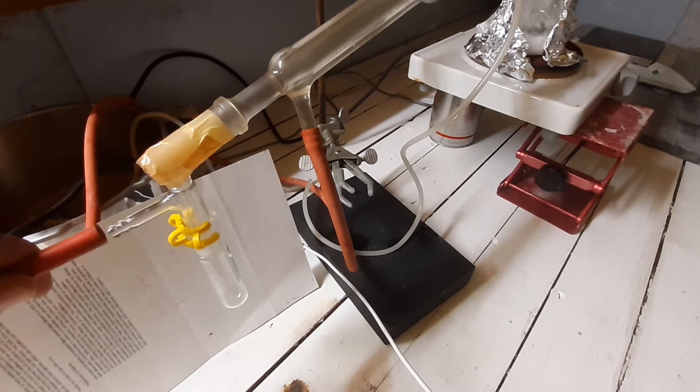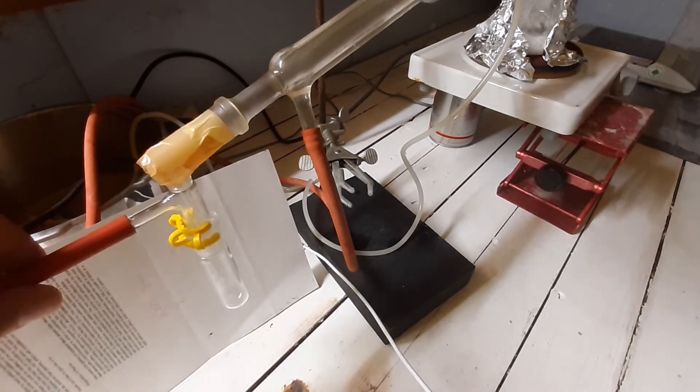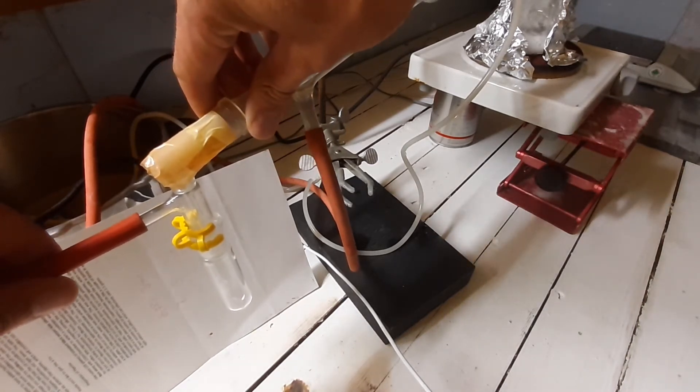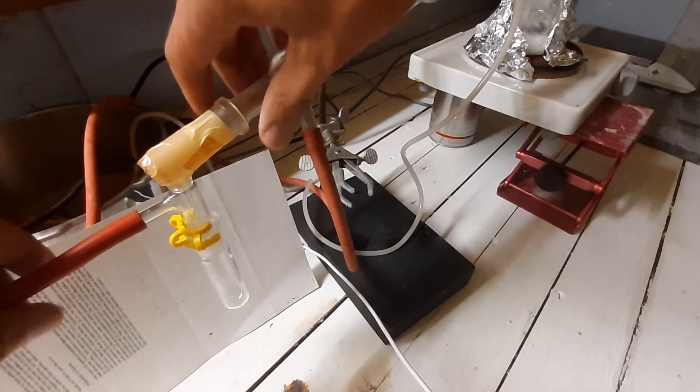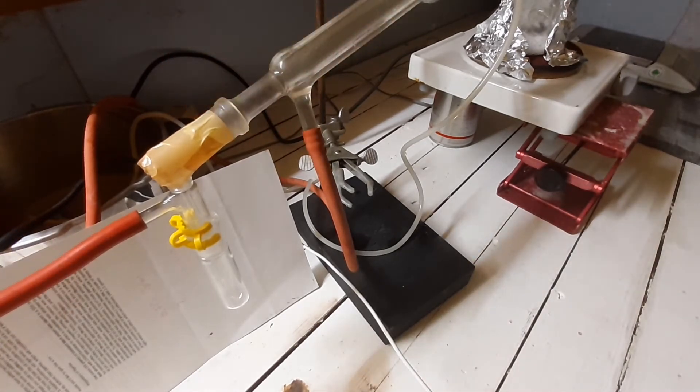I will use a tube that goes outside so I don't breathe in any of the fumes produced, because they're quite toxic. Let's see how it goes.